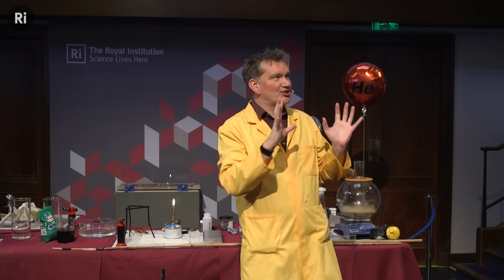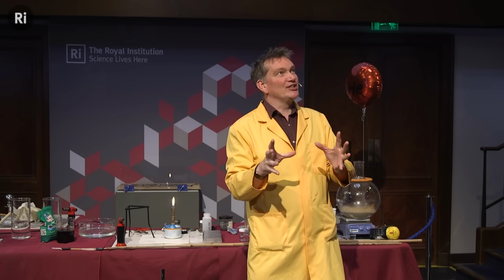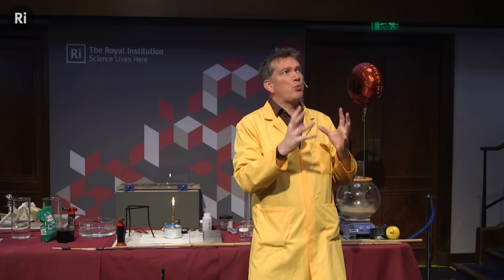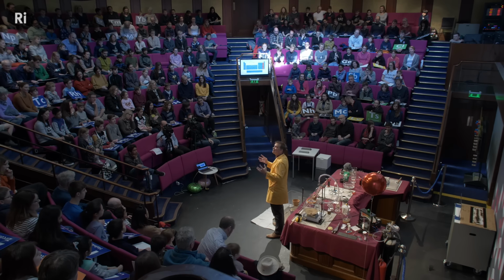And I'm hoping that when I touch this compound, not with my finger, as you shall see, it should explode very violently. And this is because these weak nitrogen-iodine bonds all rearrange during the explosion and form the very, very strong bonds that we have in nitrogen molecules. So nitrogen, like the nitrogen that we breathe in, are molecules of nitrogen where 2 atoms are very strongly bonded together to form very stable molecules. And it's this that, I hope, will drive this explosion. It's the formation of the nitrogen gas.